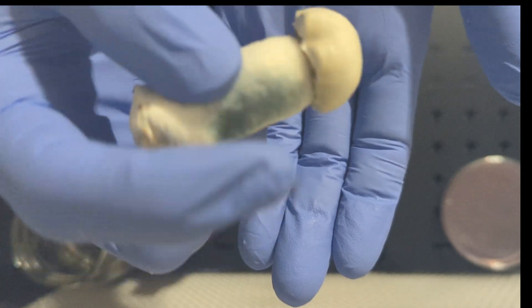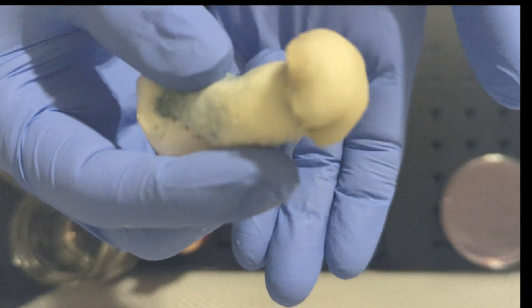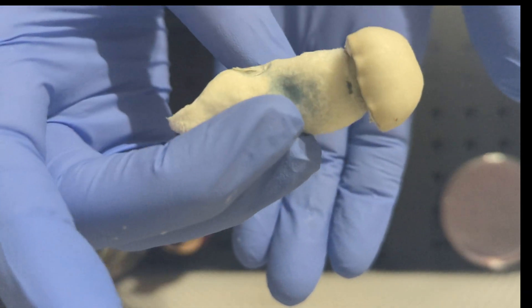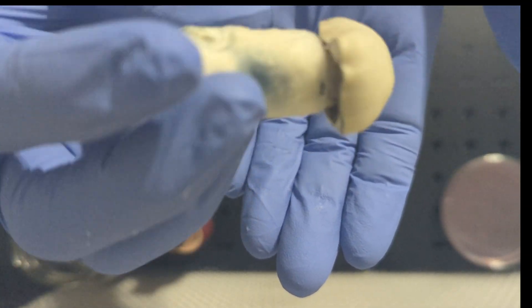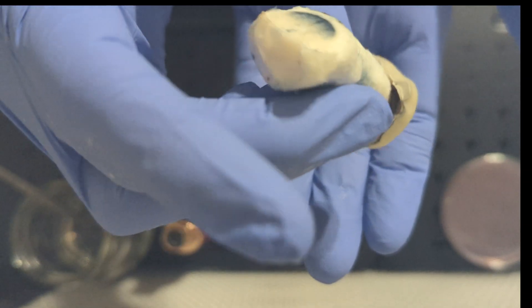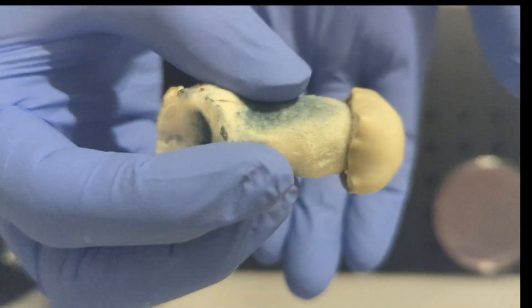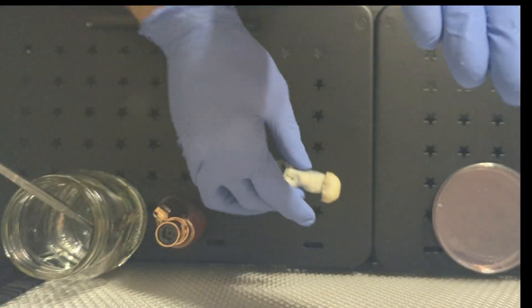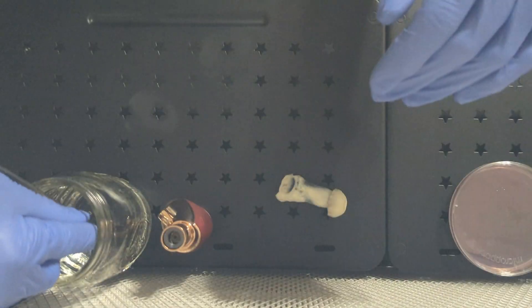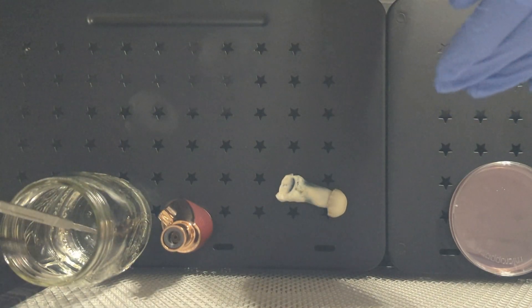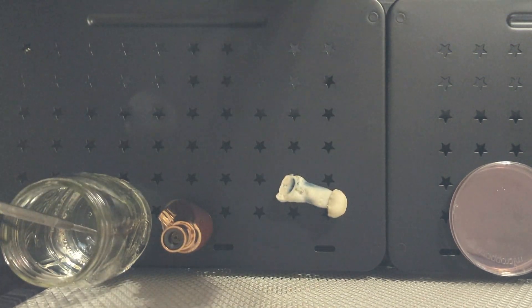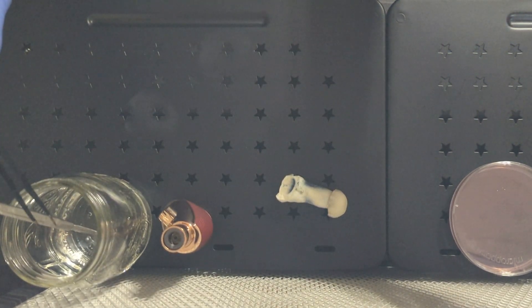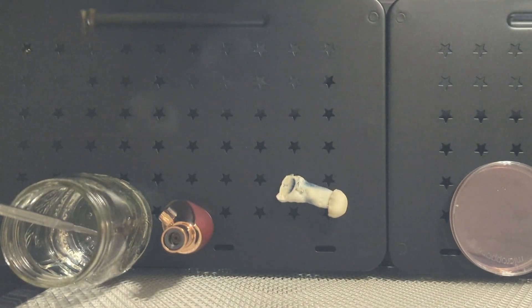When I harvest the mushroom, if there's any substrate still on the base of it, I'll usually cut it off with a clean pair of scissors. You could use a clean scalpel as well, or just rip it off. The only purpose of this is just to keep from getting substrate all over your workstation. You want to try and avoid getting substrate in the cloning tissue sample or in the agar dish as it's probably contaminated.